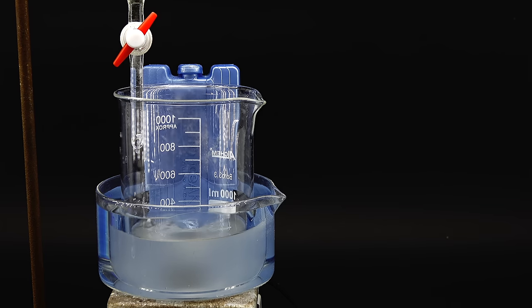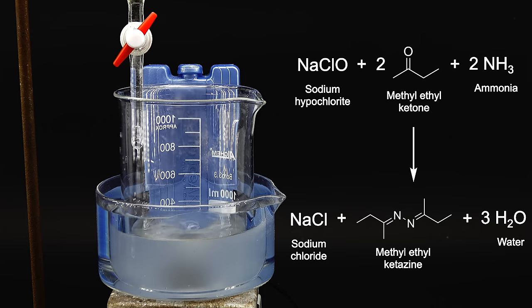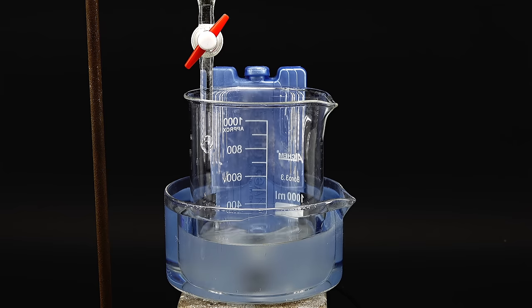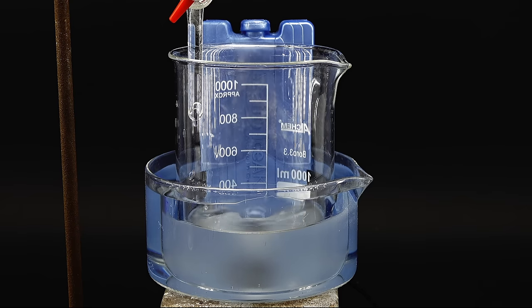With everything ready, I lightly opened my funnel's valve, letting small drops of the bleach fall into the methyl ethyl ketone ammonia mixture. At first glance, it didn't really seem that much was happening. On the molecular level, however, several reactions were taking place, the most important of which was the creation of this weird molecule called methyl ethyl ketazine, which consists of two methyl ethyl ketone molecules bonded together through two nitrogen atoms arranged in a way resembling hydrazine. The ketazine formation should be pretty much the only reaction that's happening here. However, even with good stirring and cooling, some side reactions are always going to be present. They create the toxic gases I talked about earlier, and setting up this whole apparatus and using a gigantic excess of ammonia should help prevent them. But either way, they are the reason this whole thing must be done in a fume hood.